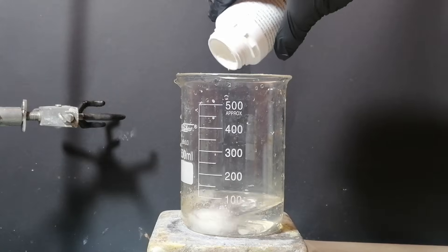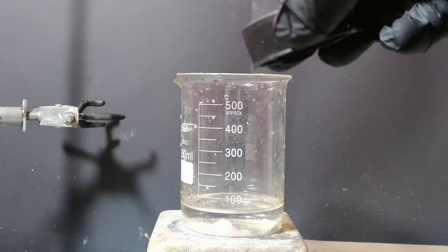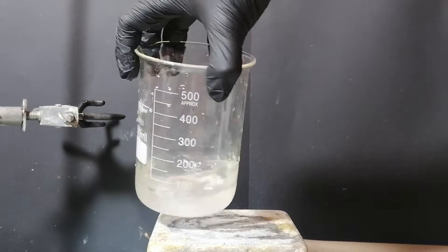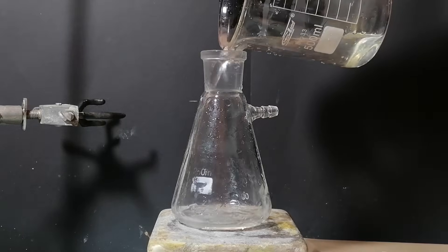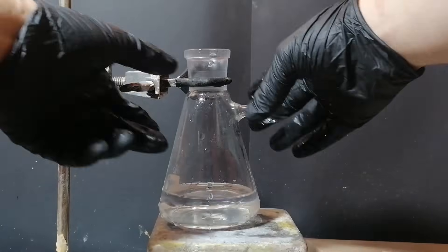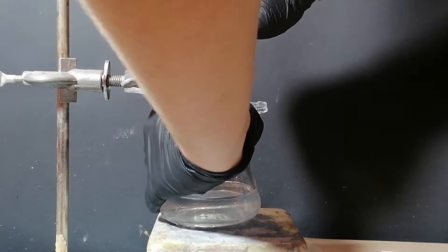So let's get down to business. First to a beaker with 100ml, I've added a random amount of hydroxylamine hydrochloride. After stirring, I've added some of that solution into a vacuum flask. After securing it with a stand, I've stoppered the top and pushed it to the side.